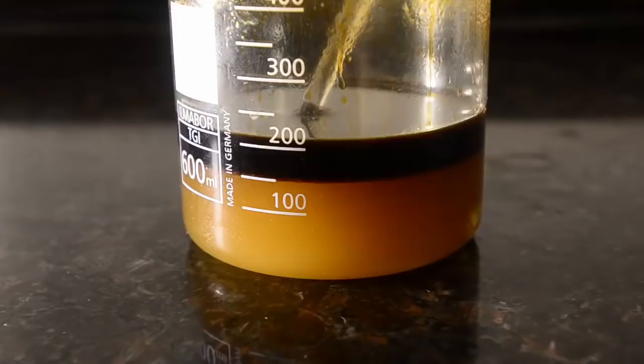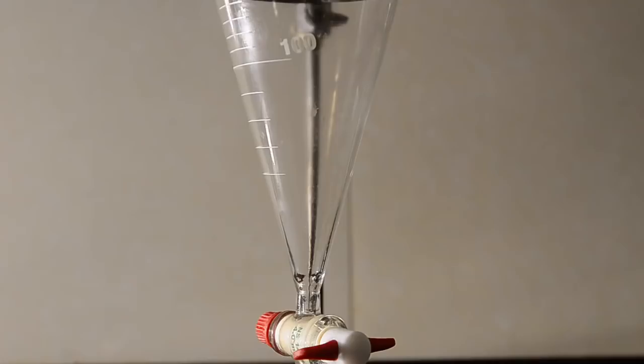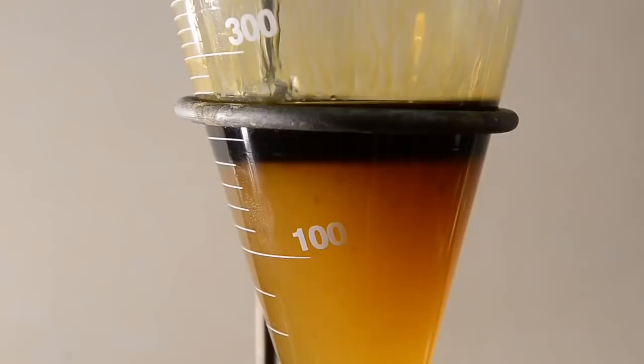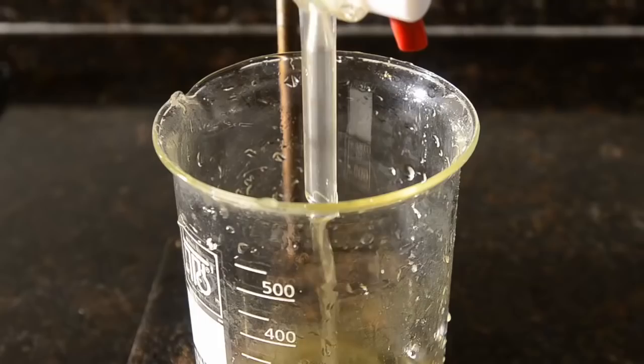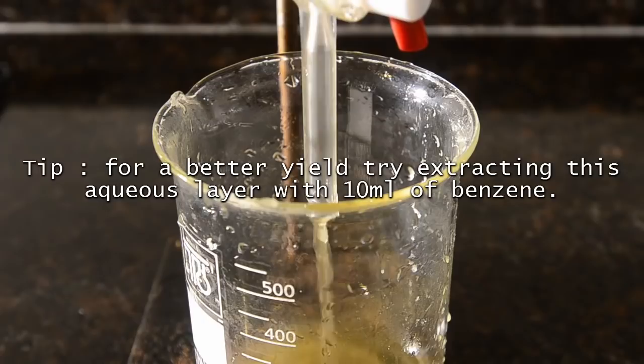The top benzene layer contains our product, so pour the mixture into a separating funnel. Allow the layers to separate well and then separate off the bottom aqueous layer. You could extract this further with a small portion of benzene if you wanted to.